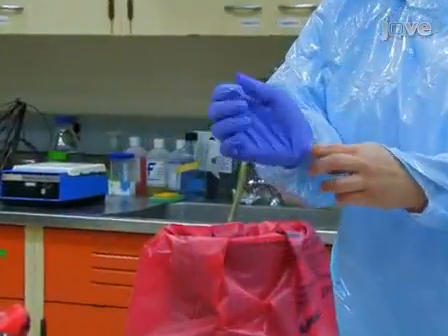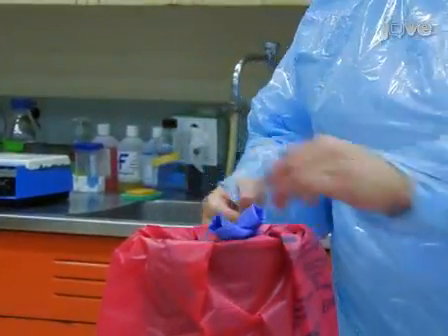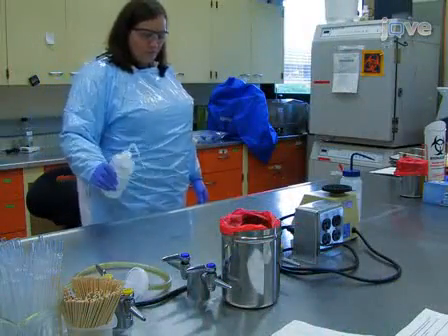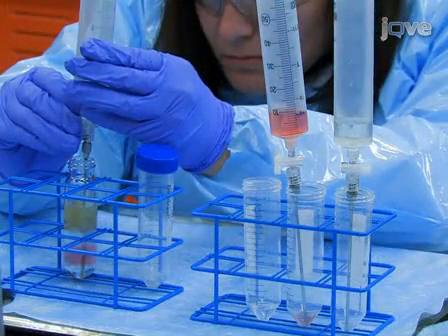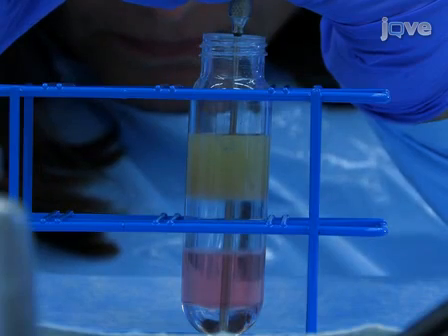We've just shown you how to purify Toxoplasma gondii oocysts from the feces of laboratory-infected cats using a discontinuous cesium chloride gradient. When doing this procedure, it's important to remember to follow all safety guidelines and to always be careful when underlaying the cesium chloride gradient by adding each layer very slowly and trying not to disturb or mix the gradient.